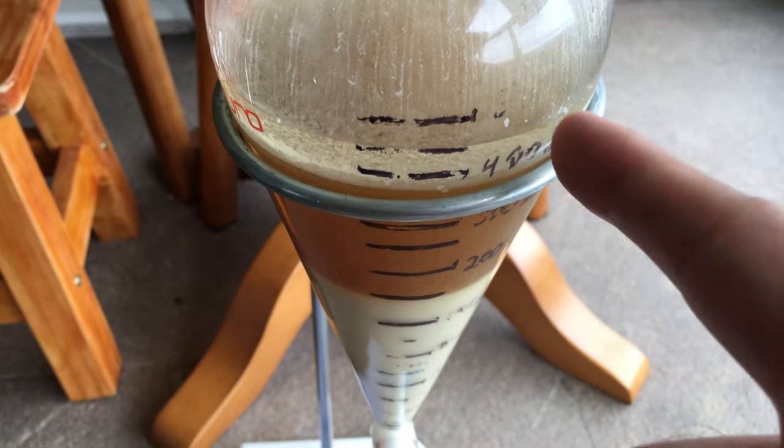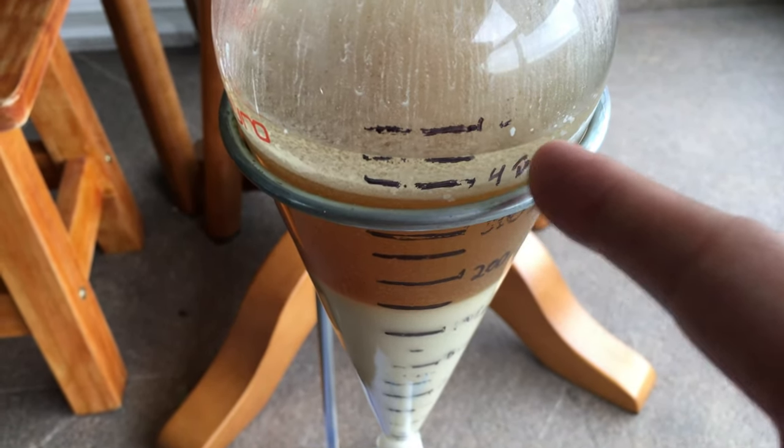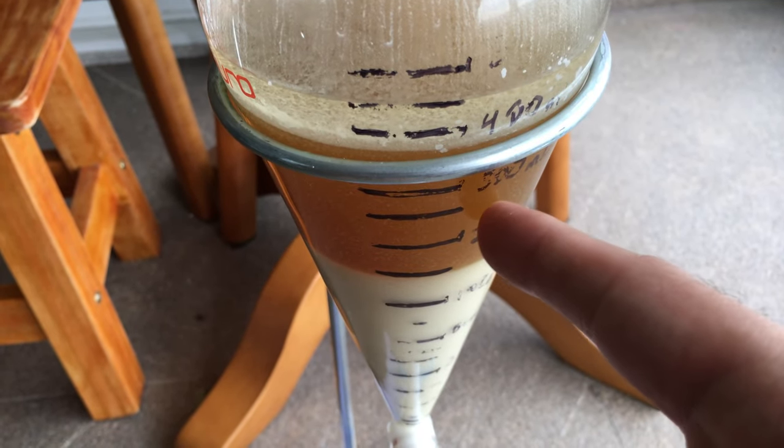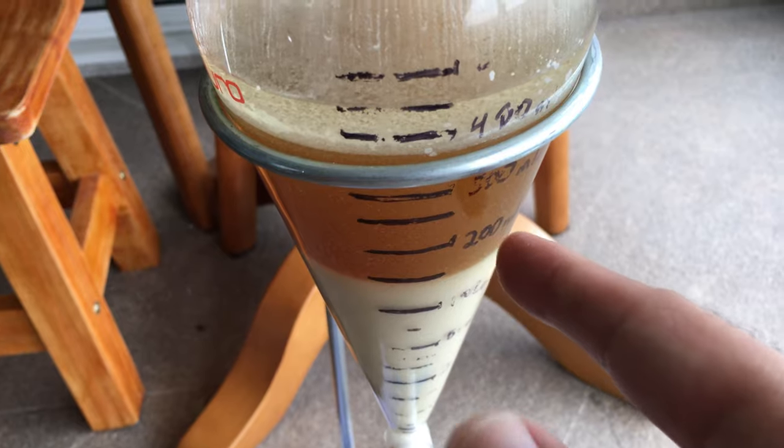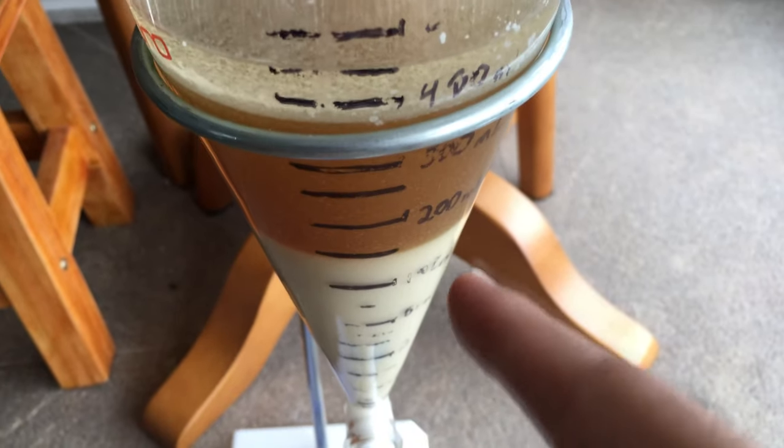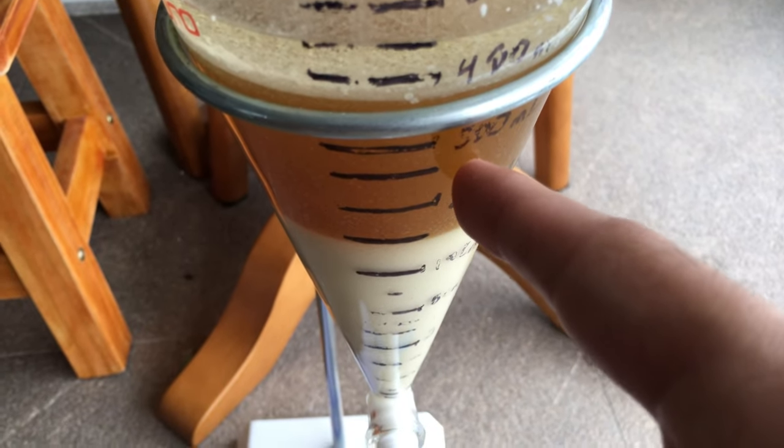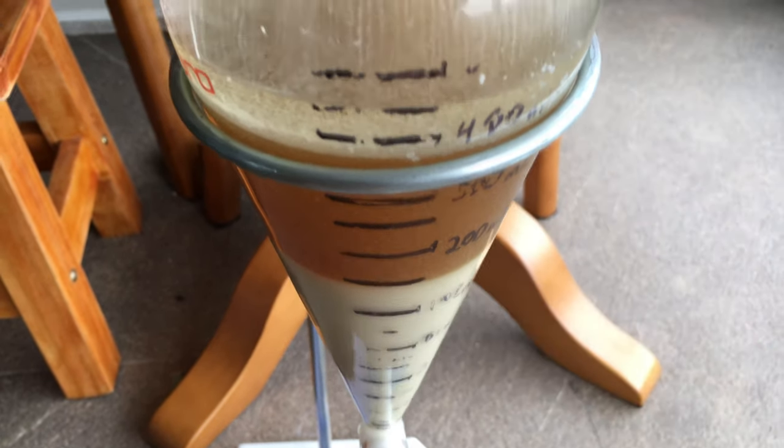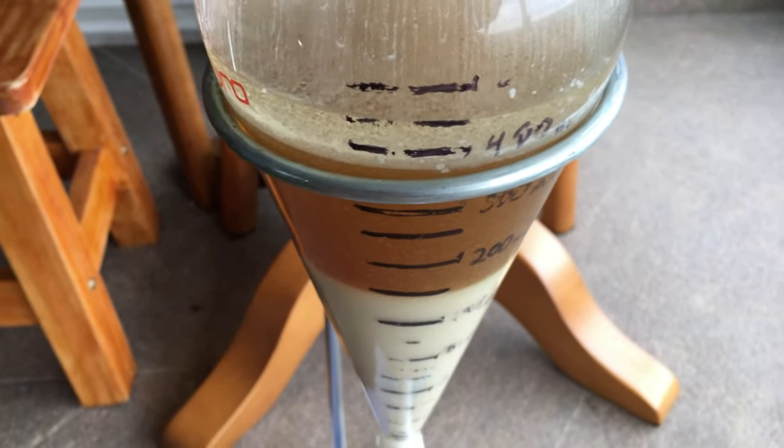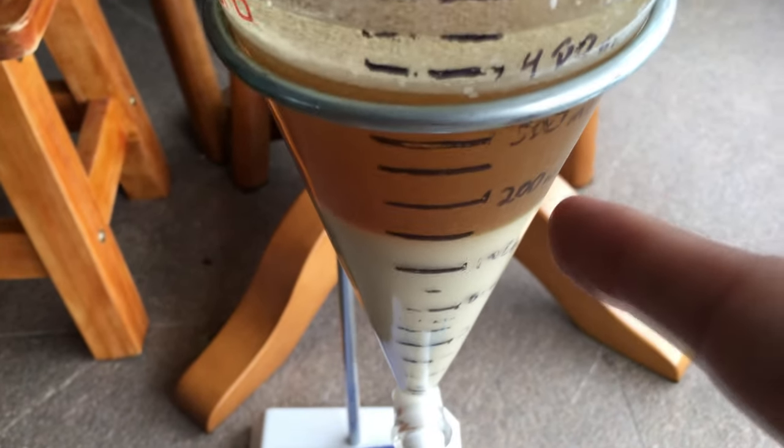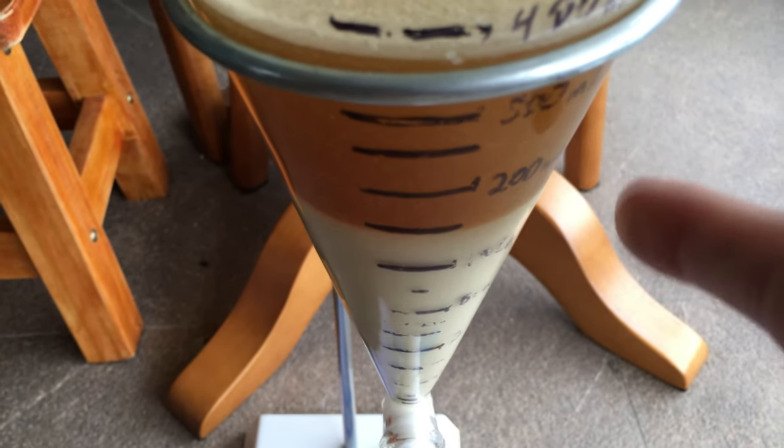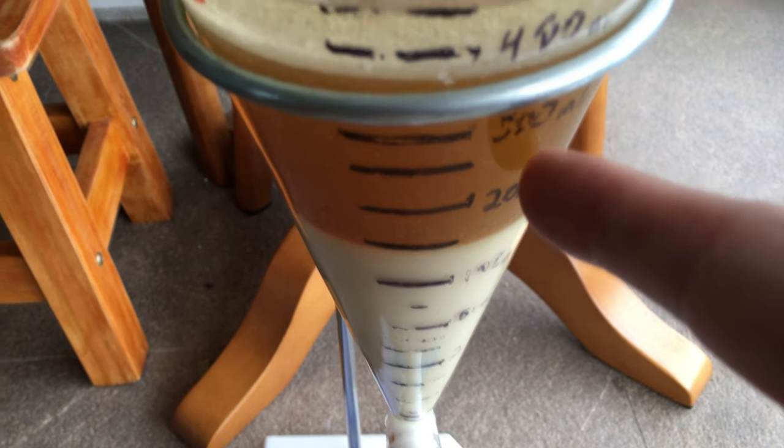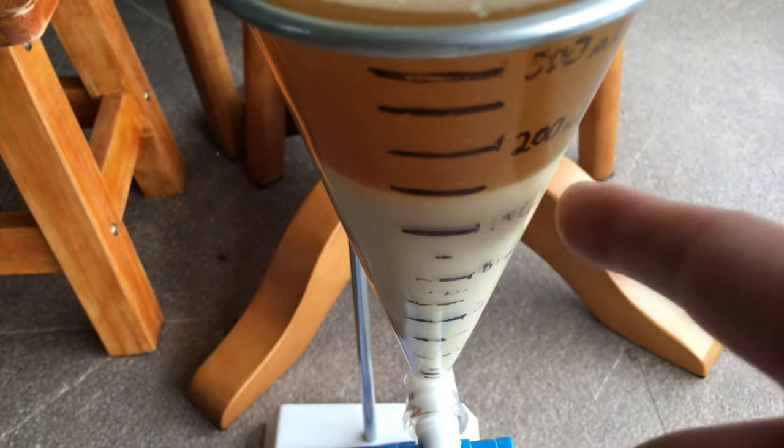I'm going to repull with 100 milliliters of ethyl acetate. This is the combined of all the teas I had. I didn't have any more sodium carbonate and the pH was pretty low, that's why there was such a low crystallization. So I went against my better judgment and just added calcium hydroxide. This is calcium carbonate that precipitated out.